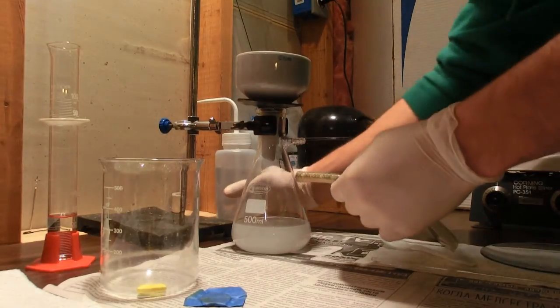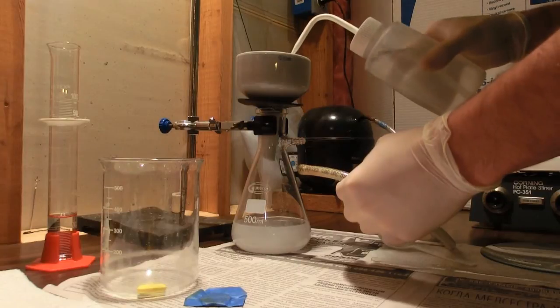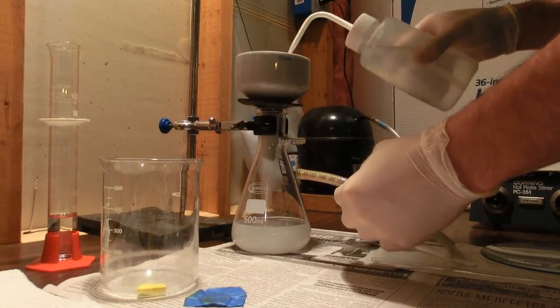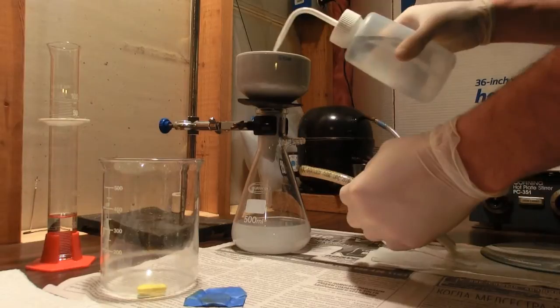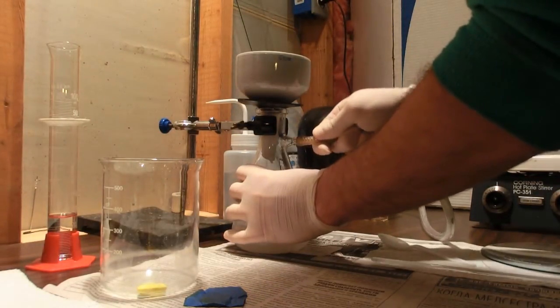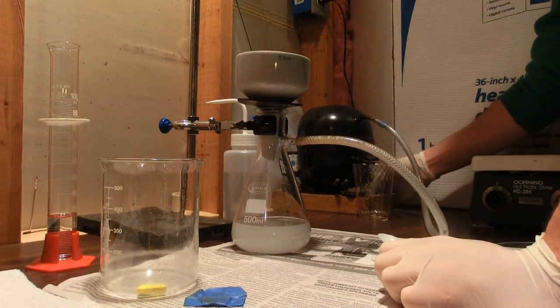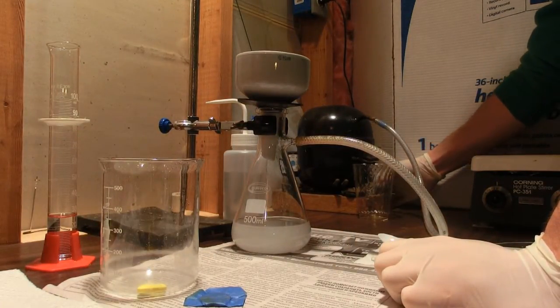I'm going to wash it one more time and then I'm going to pull air through it until the filter cake is dry. I'd like it to be dry before we move on to the next step.